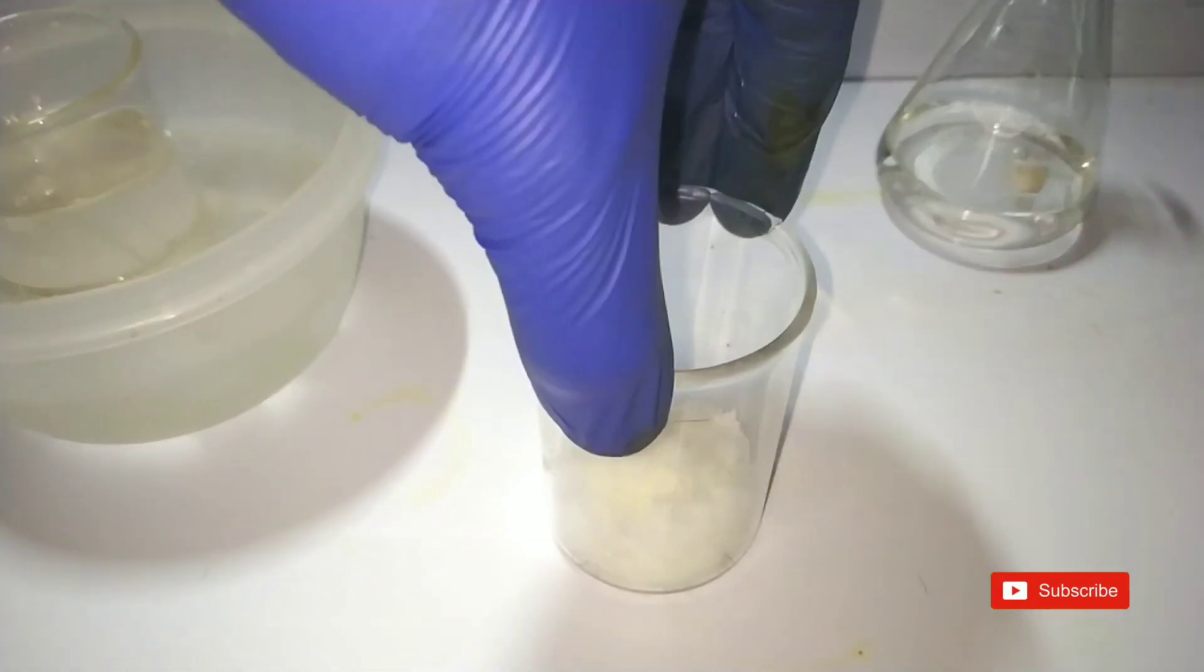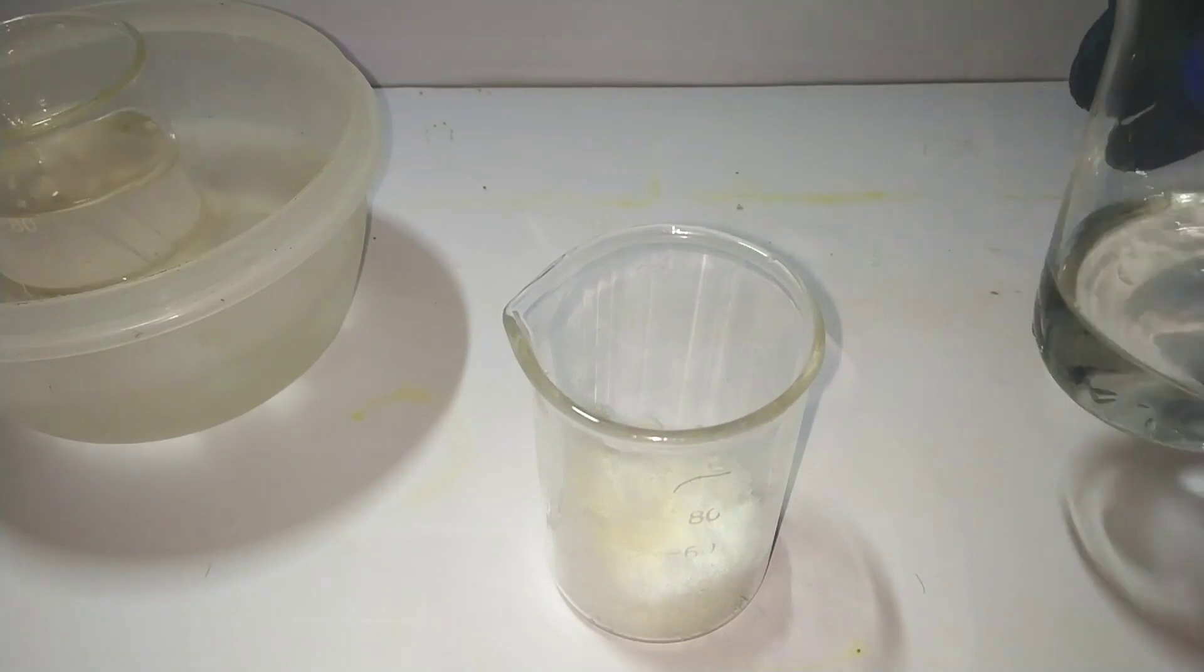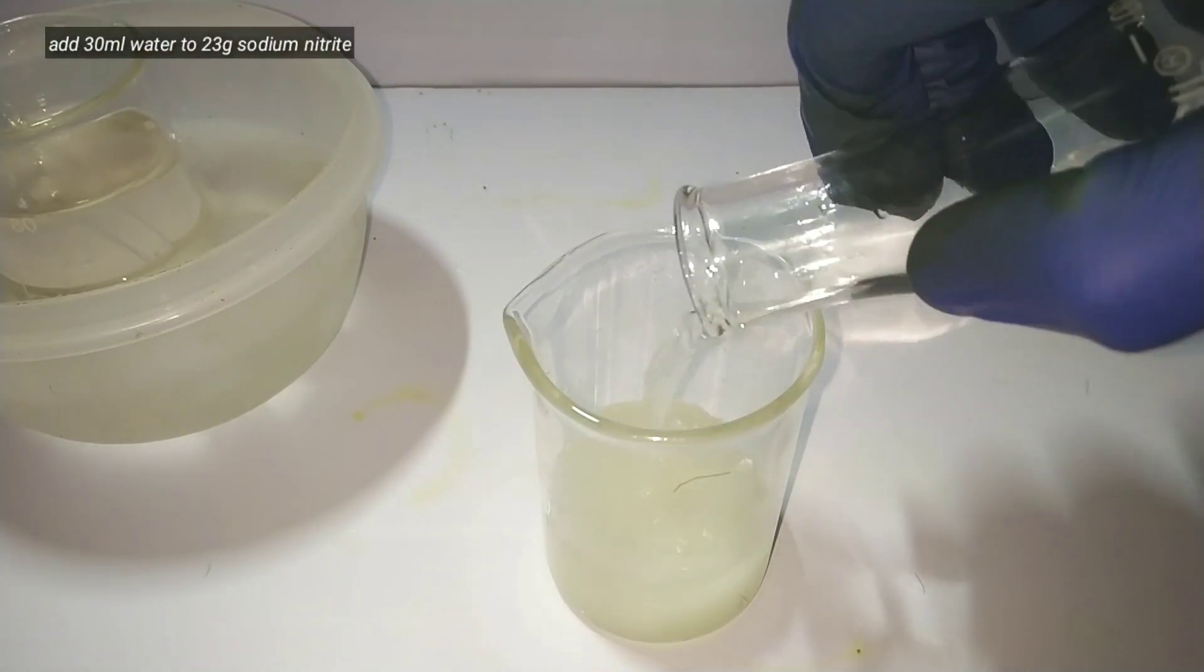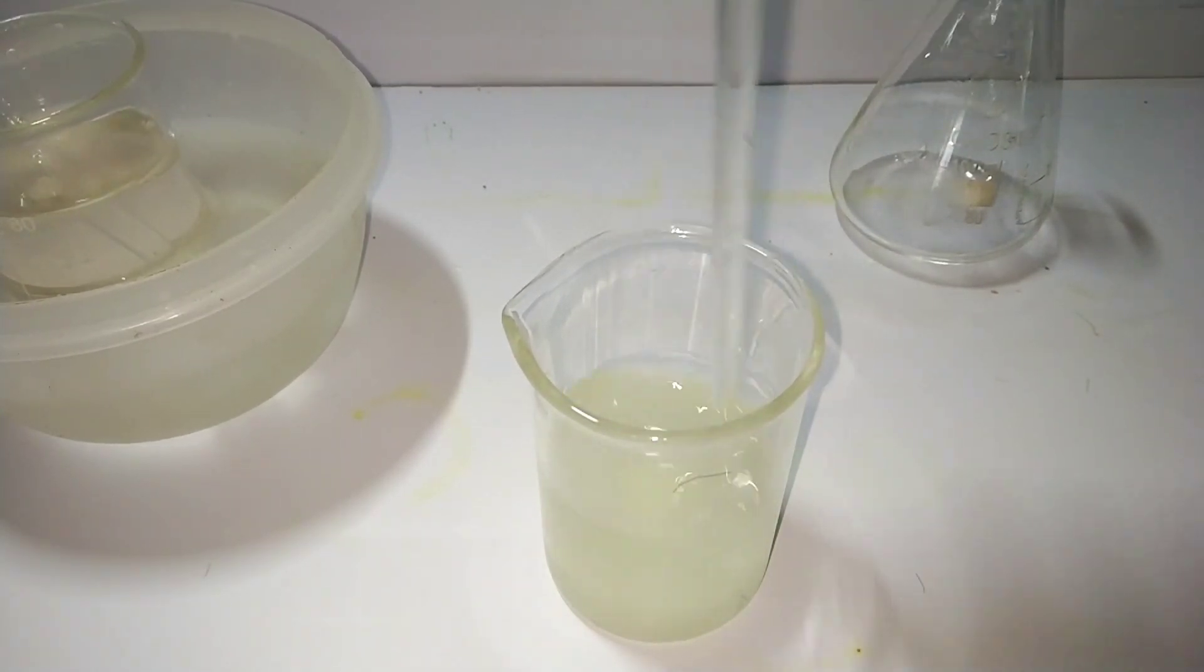We have weighed out 23 grams of sodium nitrite here. Now we add 30 ml of distilled water into that to make a saturated solution. Note that it is sodium nitrite and not nitrate.